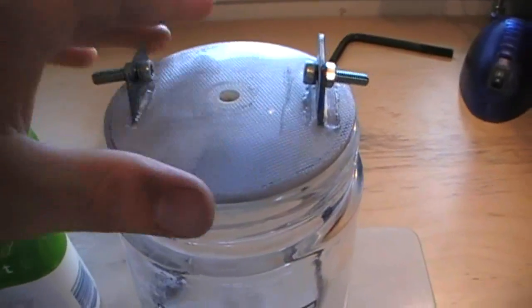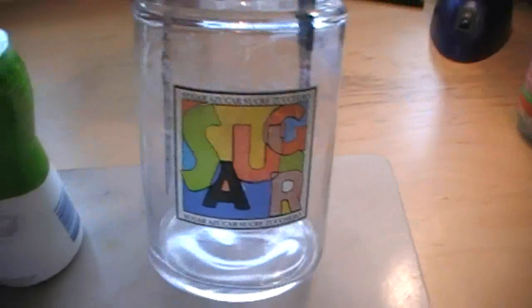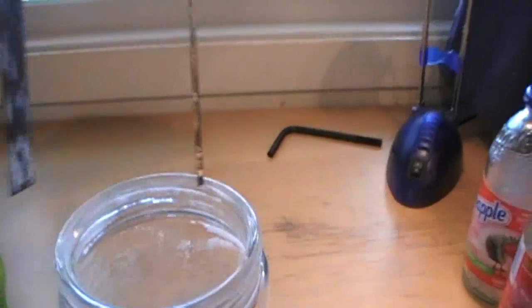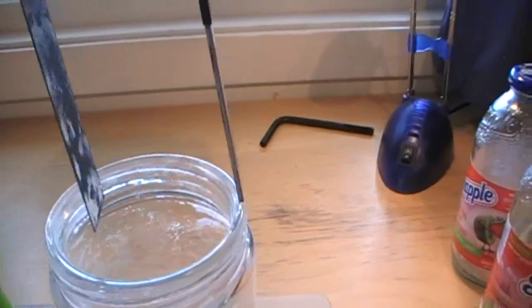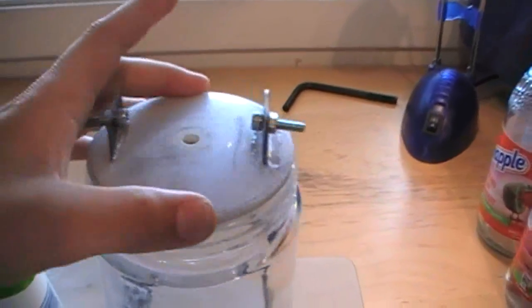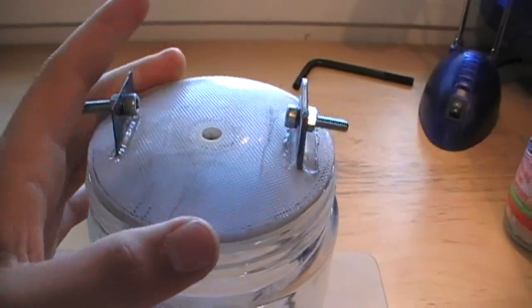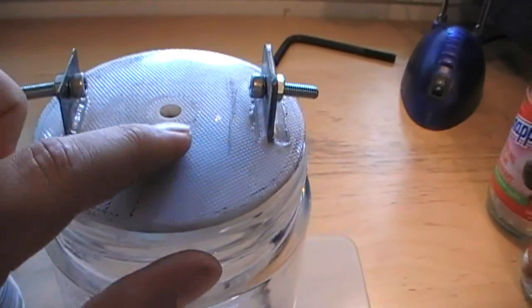Here is the cell and yes it is a sugar jar and I made this lid and put the electrode in. It is a double plate so it won't go anywhere and I just melted the electrode through and that worked pretty fine.